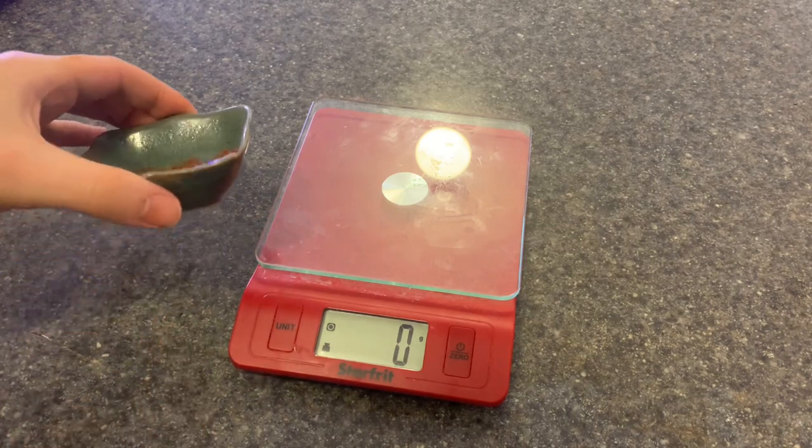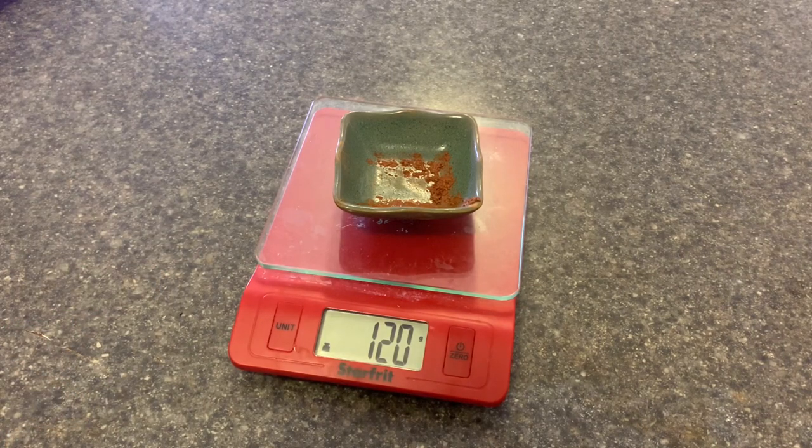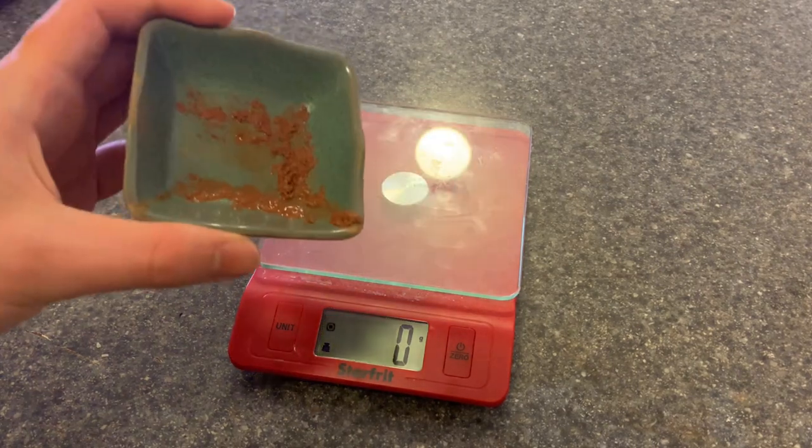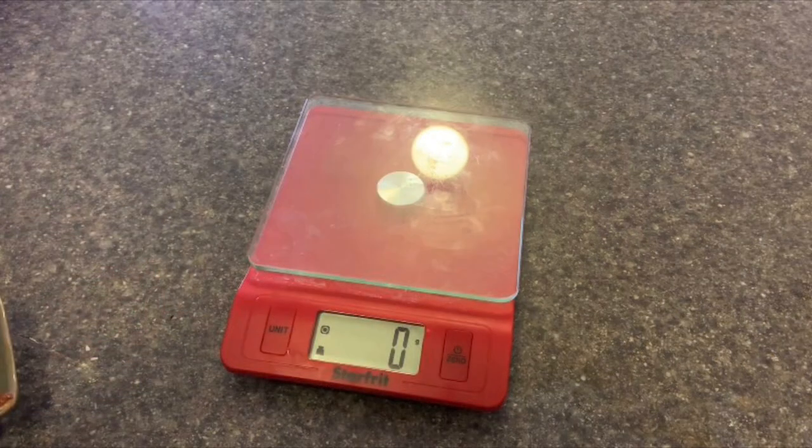I know that one of these bowls weighs 116 grams, so if I put this thing on right now it weighs 120 — meaning there is roughly 4 grams of iron-3-oxide inside of it. Now, to make thermite, I will need 30% of that to be aluminum, so therefore I need roughly 1.3 grams of aluminum dust. I didn't get as much as I wanted, but this thing holds a lot of potential energy — thermite reactions heat up to a few thousand degrees, roughly. I did manage to get iron-3-oxide. If there are any iron-2-oxide pieces in this after the reaction is done, just pour some more hydrogen peroxide inside and you'll be done with the process. To get thermite, you need to mix a third of this thing's weight in aluminum dust into the mixture — for example, this thing weighs 4 grams, so I will need 1.3 grams of aluminum dust.